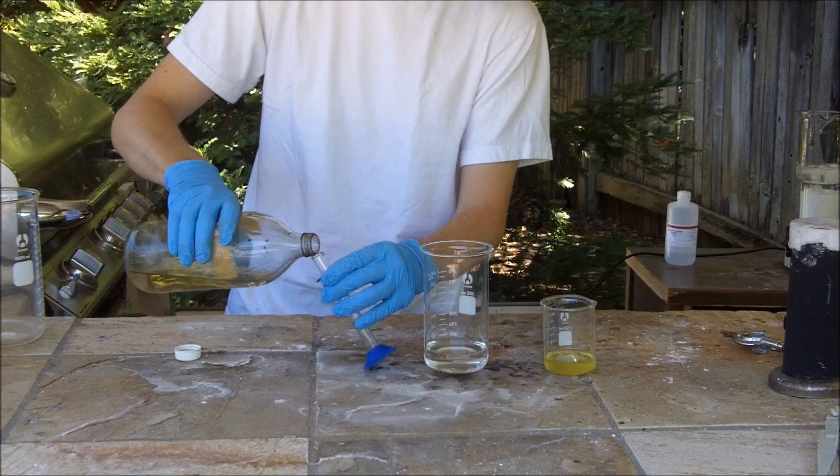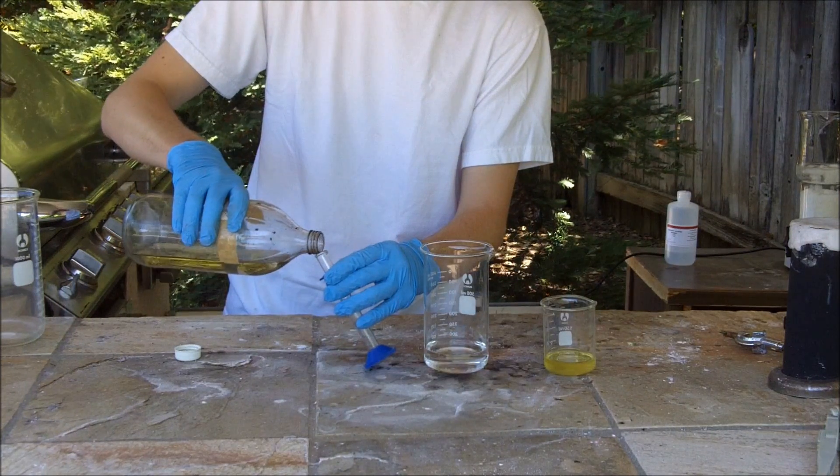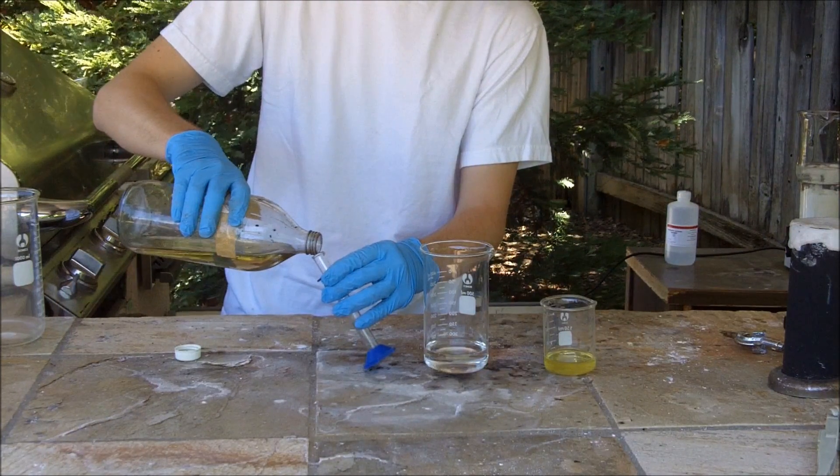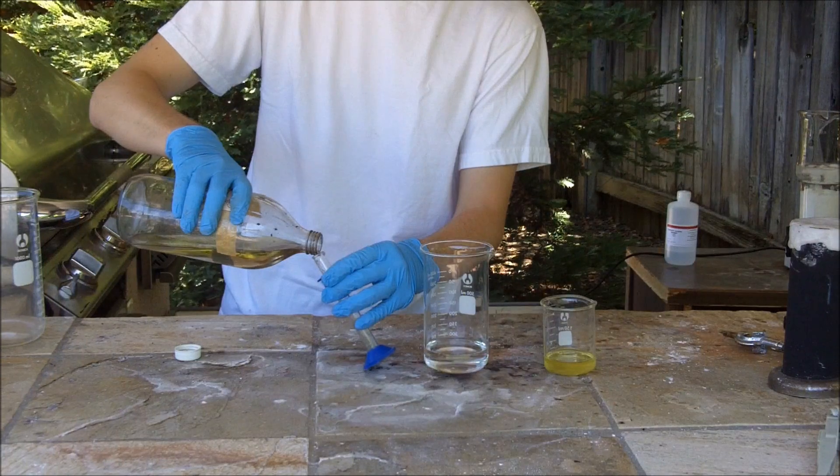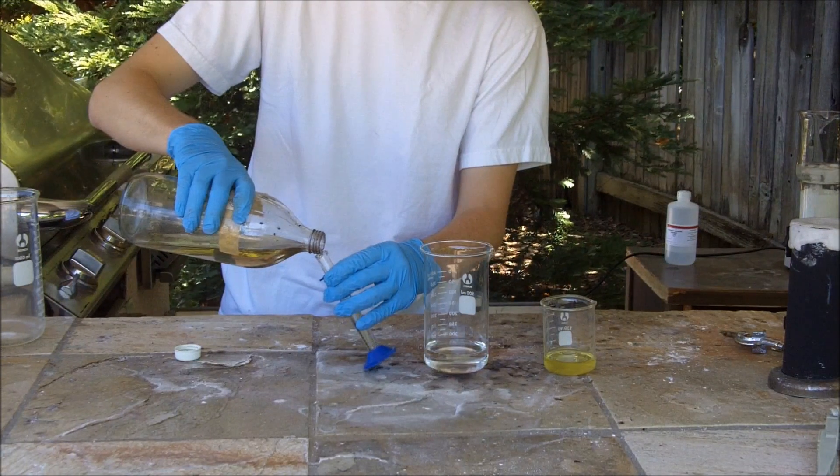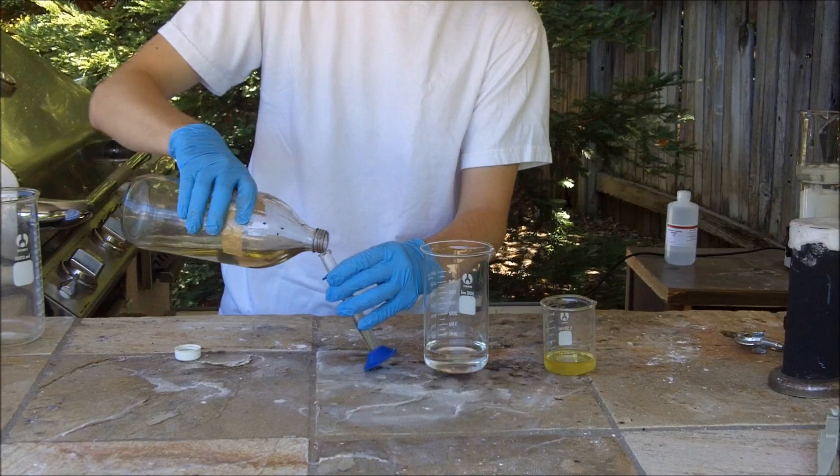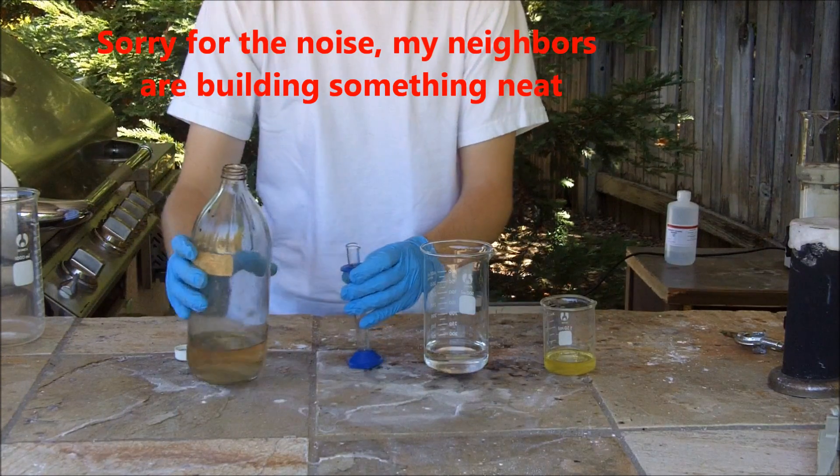This is a very exothermic reaction, the dissociation of sulfuric acid, so be very careful. 10ml first.